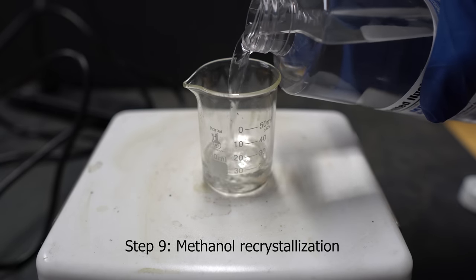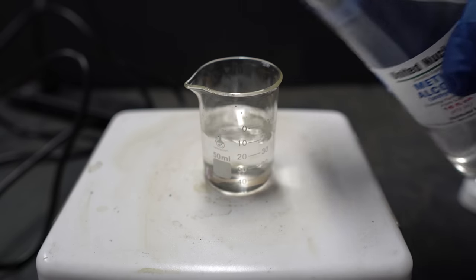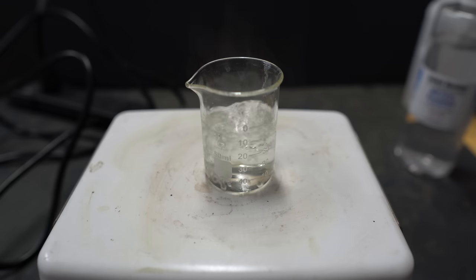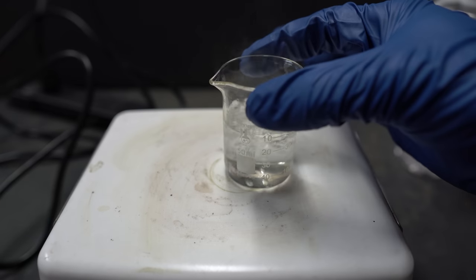While this does look like lumps or powder, it's actually nice crystals with some chlorophyll impurities. It's very important to let everything evaporate and make sure there's no acetone in there. Rather than using isopropyl for recrystallization, I actually found a methanol recrystallization online and it worked a lot better.